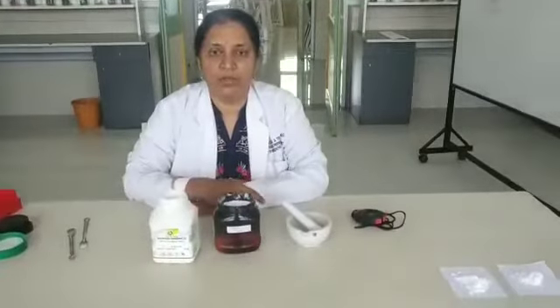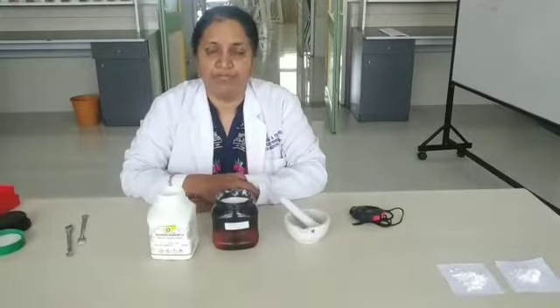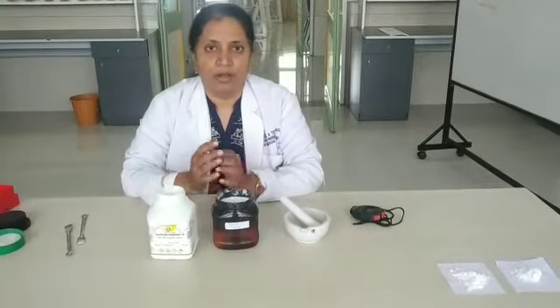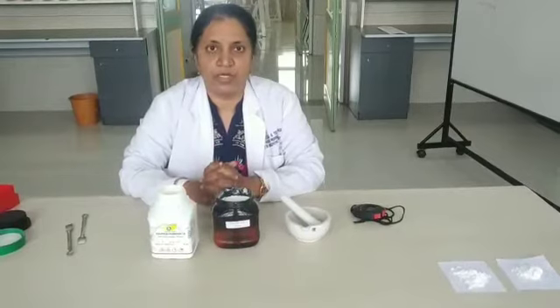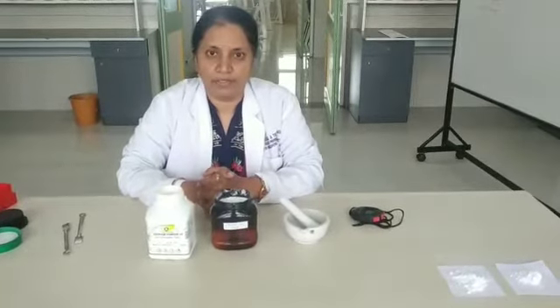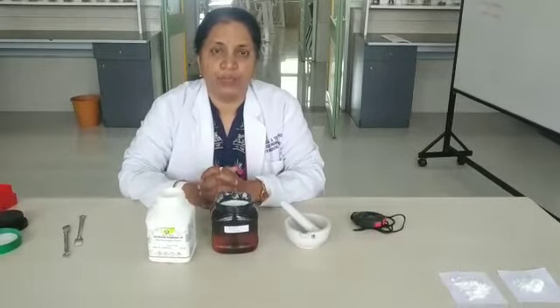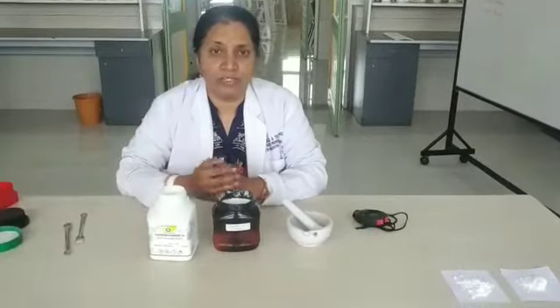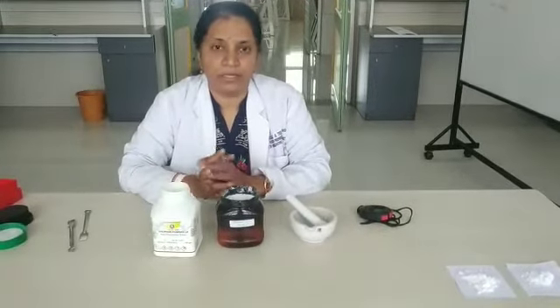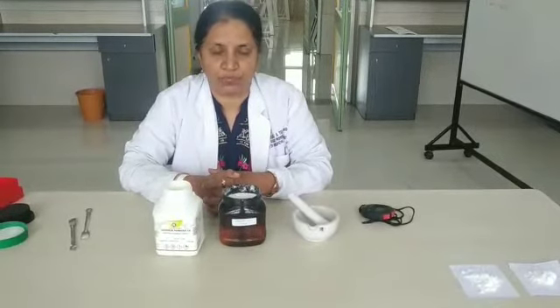Hello students. Today we are going to have a practical of trituration. We have already completed this topic in the theory class. Potentization is a mathematical mechanical process whereby we are going to arouse the dynamic curative power of the drug. The two methods for potentization are trituration and succussion.